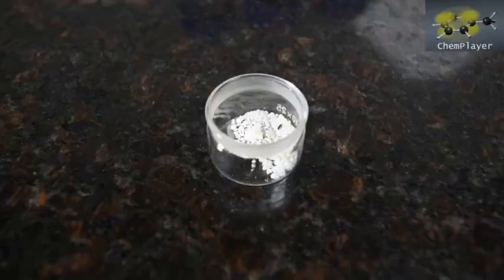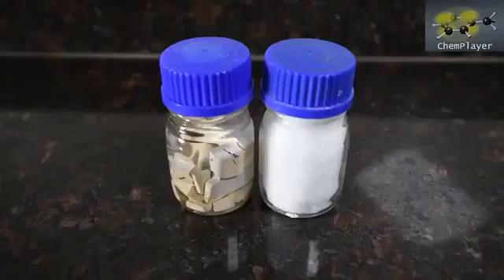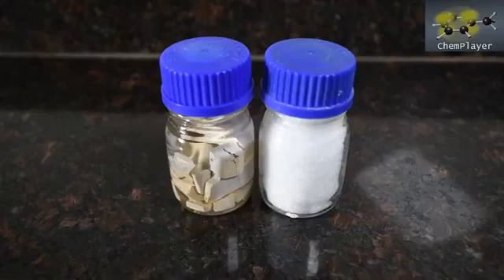So don't be stupid. We made this sample using the sodium reduction of anhydrous potassium ferrocyanide. Check out our previous video for details. OK let's do this. Urban legend number 1: is it possible to create a cyanide salt by reducing urea with sodium metal? Let's find out.